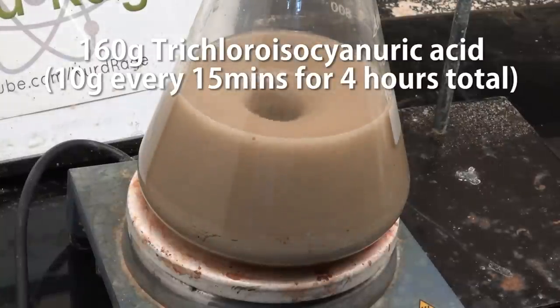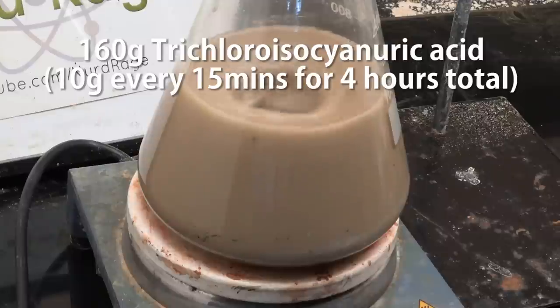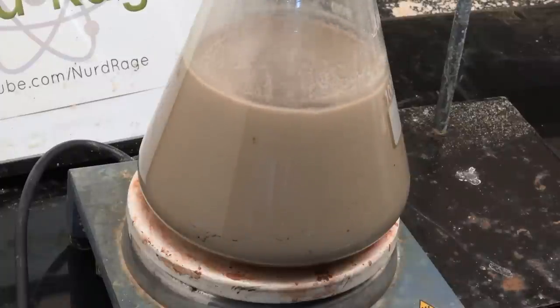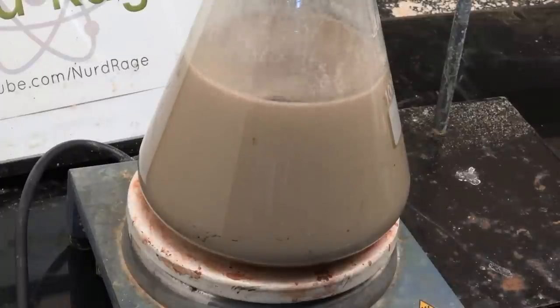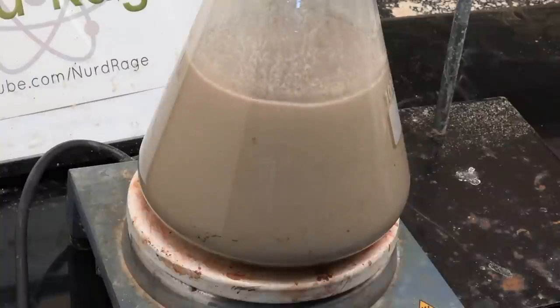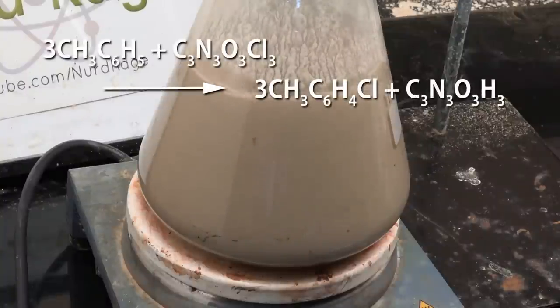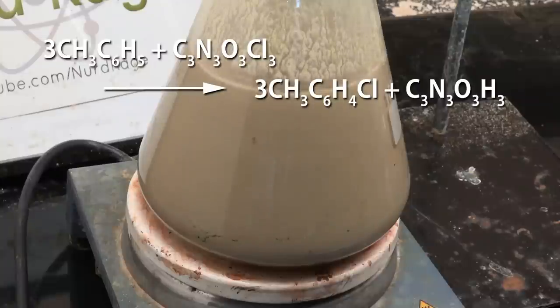Now vigorously stir the reaction mixture and add to it 10g of trichloroisocyanuric acid powder every 15 minutes, for a total of 160g over 4 hours. Between additions take the funnel out and stopper the Claisen adapter so the vapors go into the reflux condenser instead.